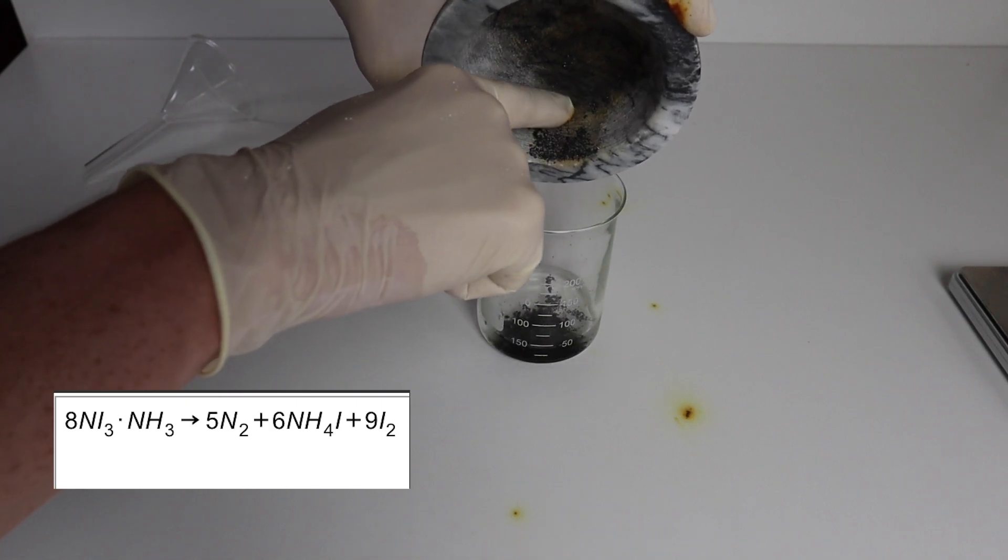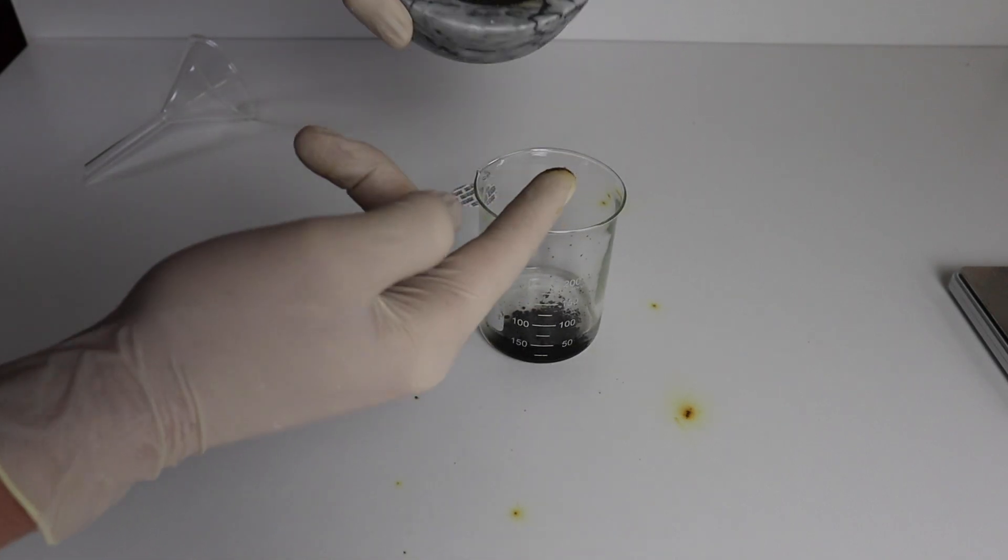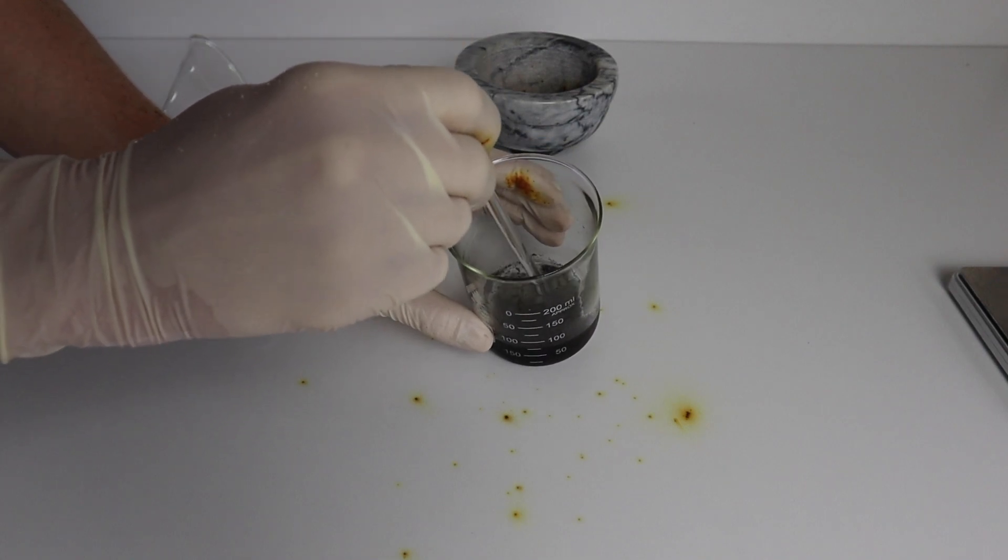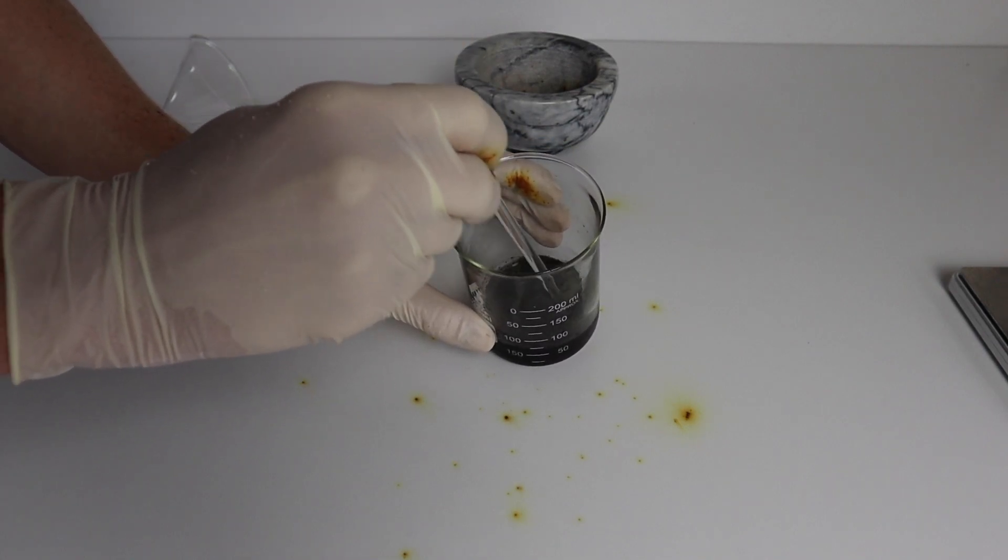When nitrogen triiodide is damp, it is safe to stir and handle. However, once it is dry, the slightest touch will set it off.